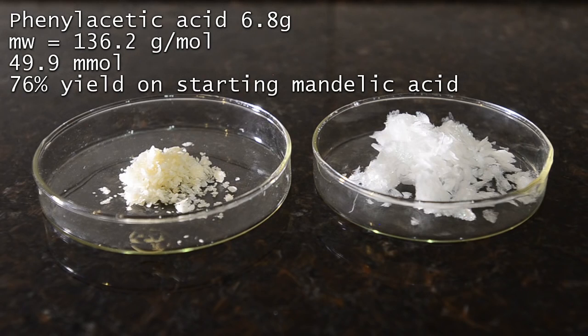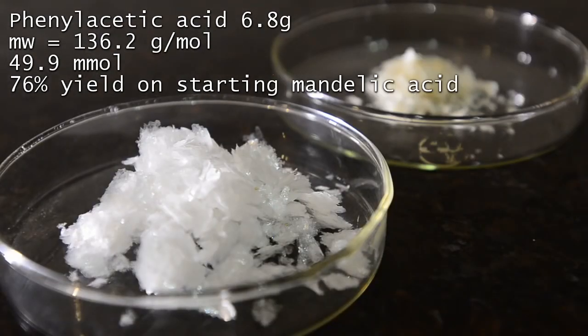We're impressed with this reaction and surprised it works so well compared to the traditional red phosphorus method. It's one to remember. The crystals of our product are certainly very beautiful.